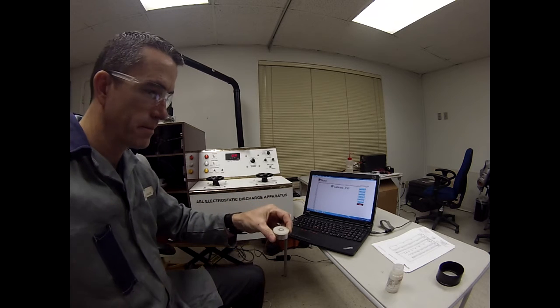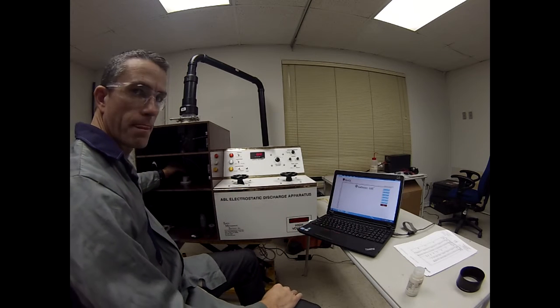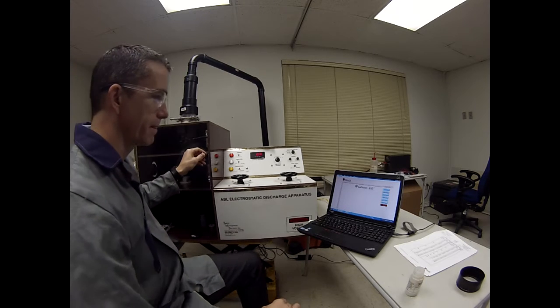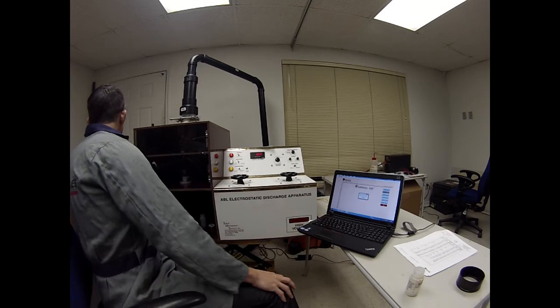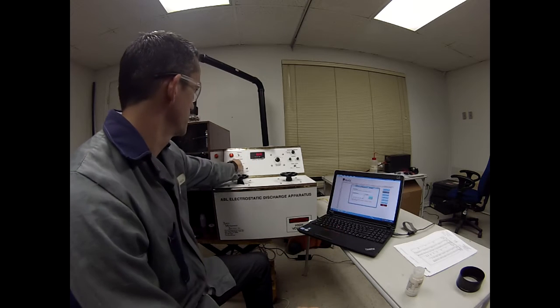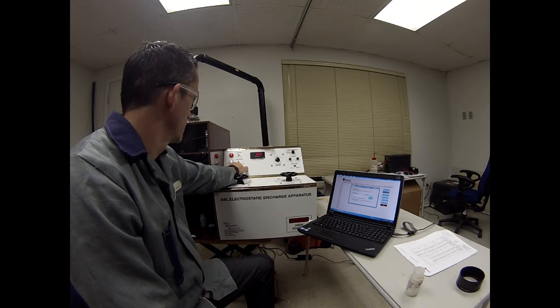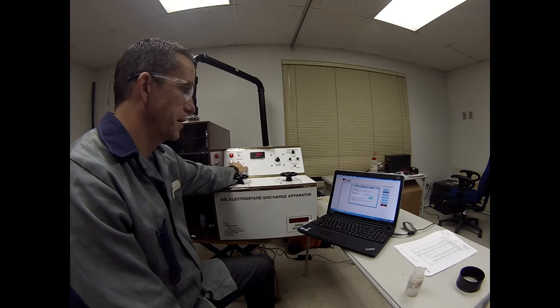Here's my reference, sand. Collect baseline. Camera should be at 8. Left stop. Now. Camera is triggering.